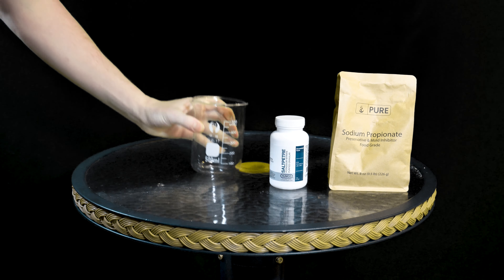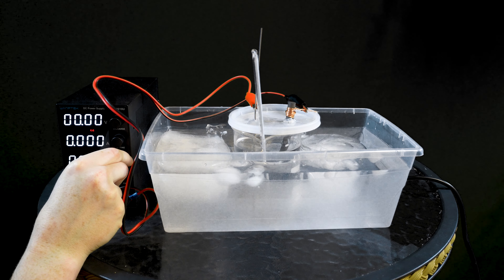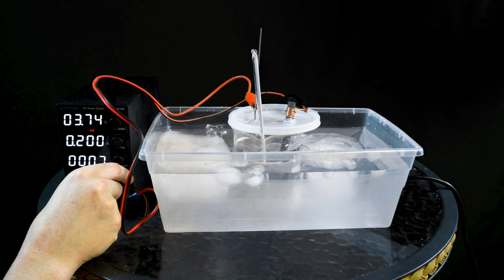Next I'm going to prepare an ice bath — the reaction should be kept below 10 degrees. I'm going to quickly check the pH before I get everything set up. For the duration of the reaction, we're going to want our pH to be about 7. I've found that it does fluctuate, so it helps to check it often. To be extra fancy, I'm going to add a blanket of argon to my beaker — don't know if it's necessary, but let's do it. Right now I'm going to start at 3 amps and we'll go from there.